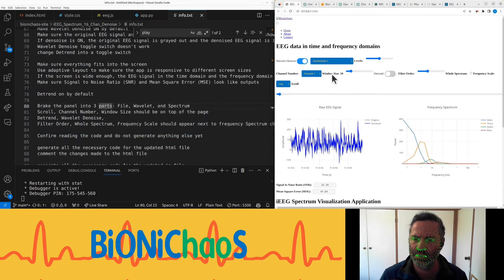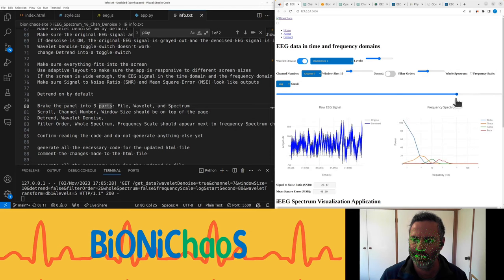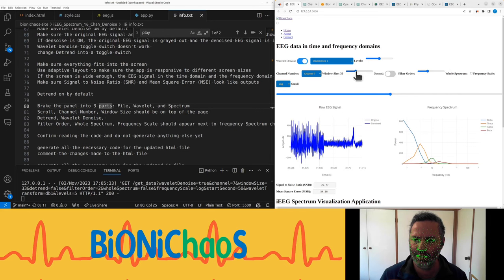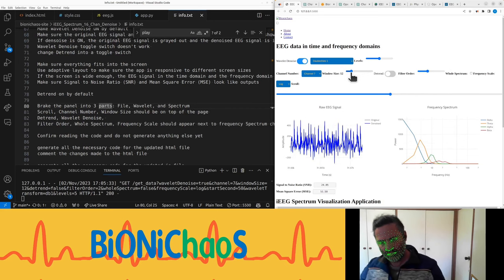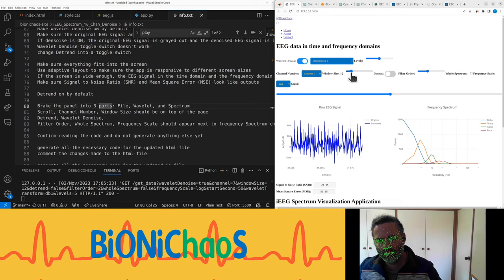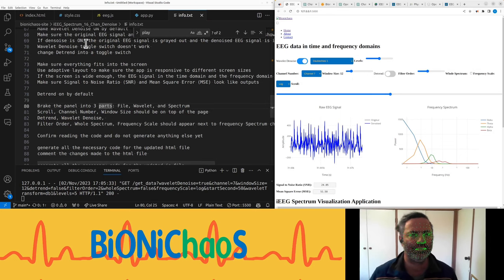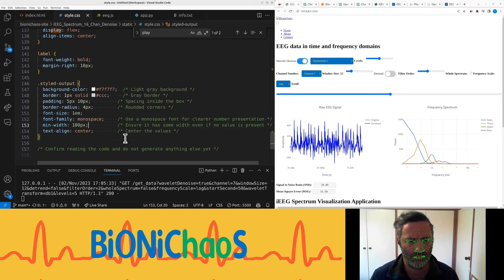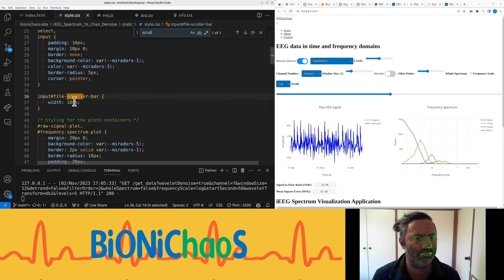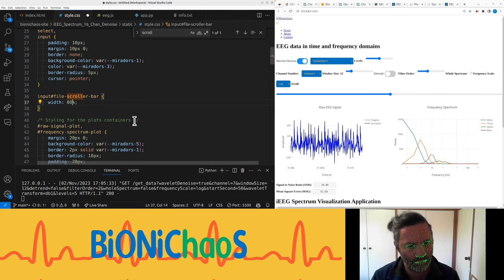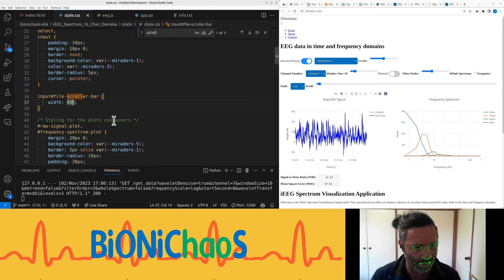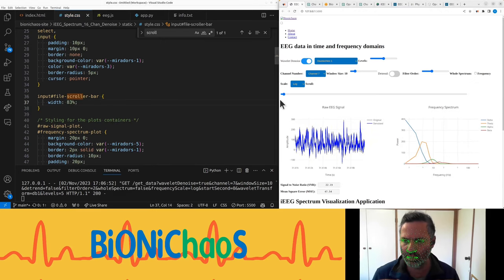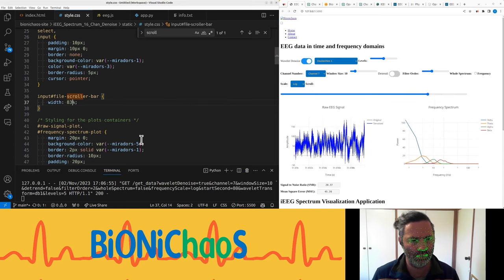We also loaded the Flask application Python code. I've read through the provided Flask application code. This script sets up a Flask web application that initializes paths and constants related to the EEG data file, loads a specific segment of the EEG data from a file into a pandas data frame, provides utility functions for Butterworth bandpass filtering, serves an index.html template when the root URL is accessed, provides an API endpoint get_data which extracts parameters from the incoming GET request, processes the EEG data based on the provided parameters, performs wavelet denoising and transforms if required, calculates the frequency spectrum for various EEG frequency bands, computes SNR signal to noise ratio and MSE mean squared error between the original and processed signals, returns the processed data as JSON to the client.